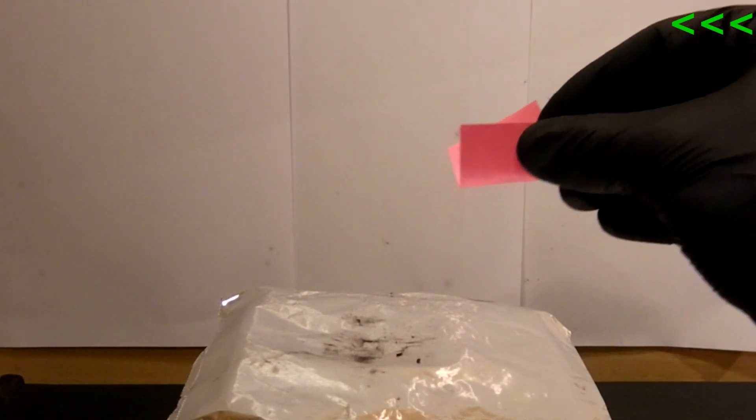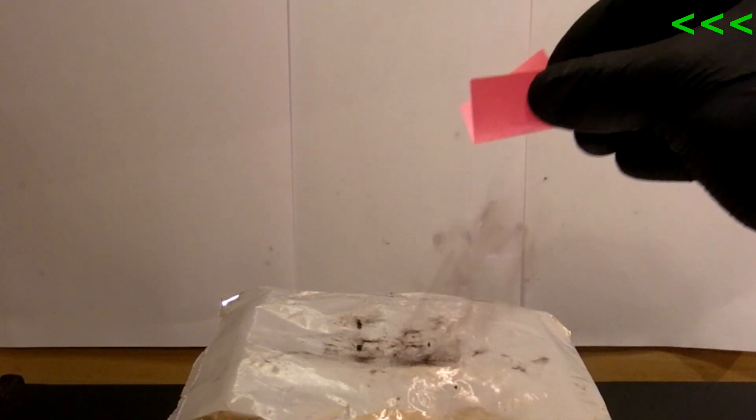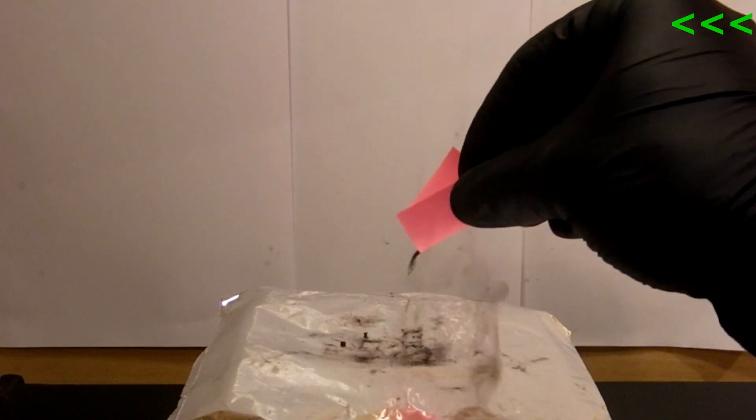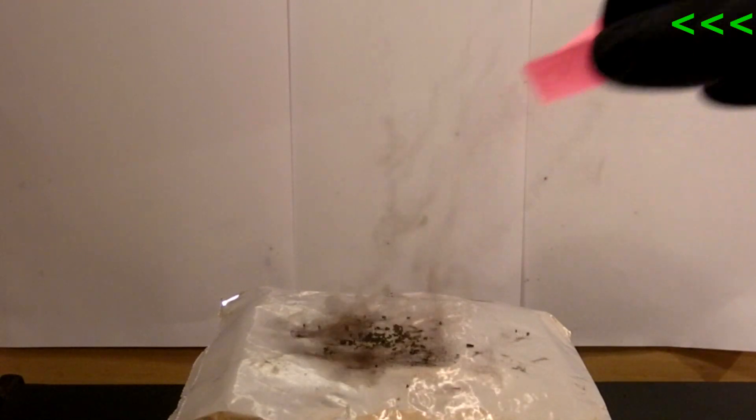However, as you can see, no detonations. I have heard one or two very tiny supersonic fractures from heating this, so be careful.